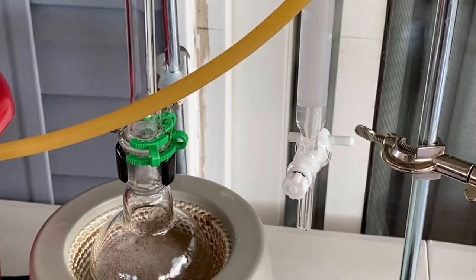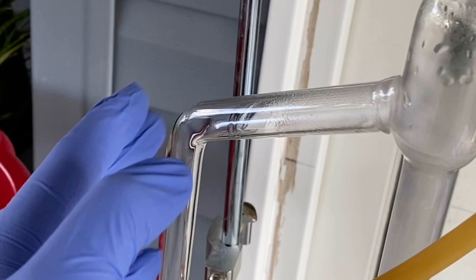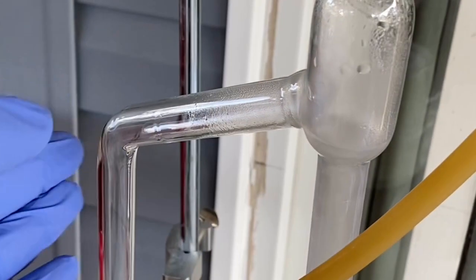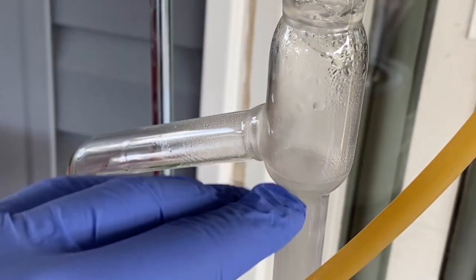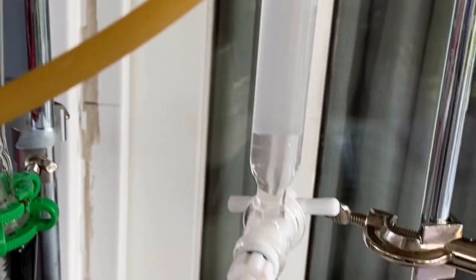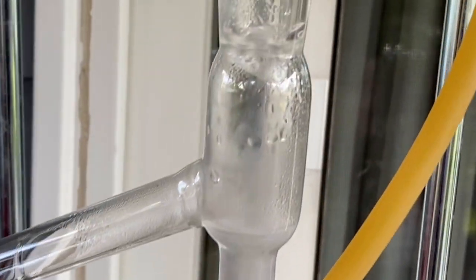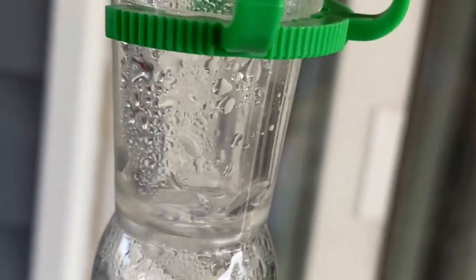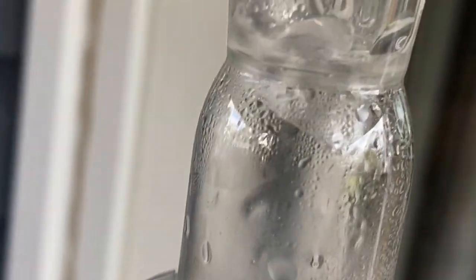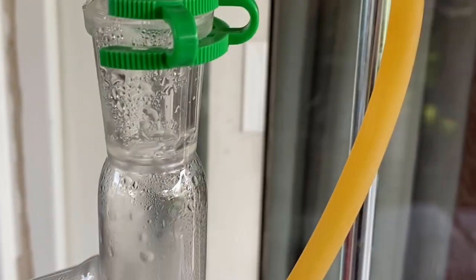I'm back. For some reason, the reflux was having some difficulties getting over this arc after this filled up all the way, so I had to raise the temperature a little bit. I'm gonna raise it a little more right now, and it's filling up again. So you can see the steam kind of filling its way up here, and I'm gonna try and get a shot of any water going down this.